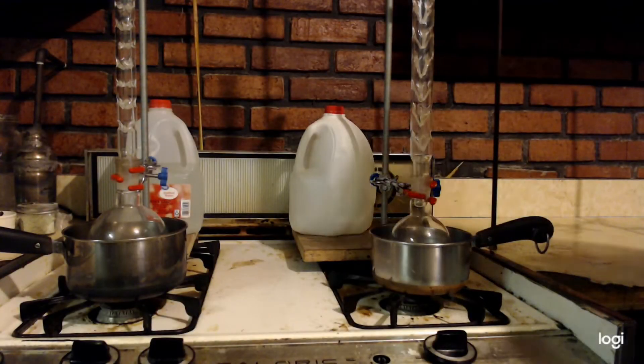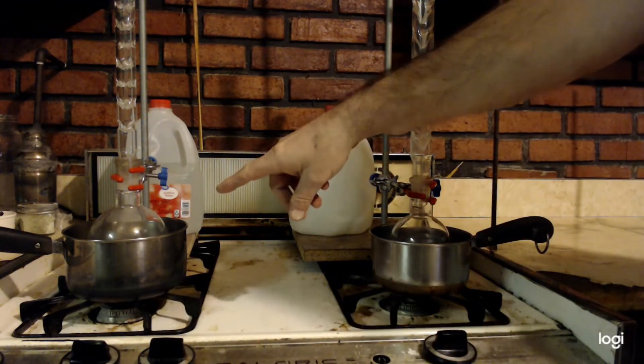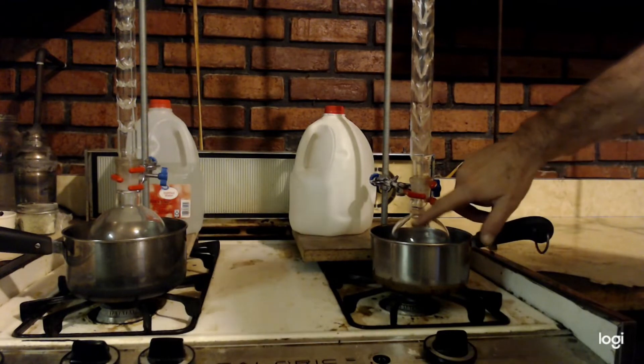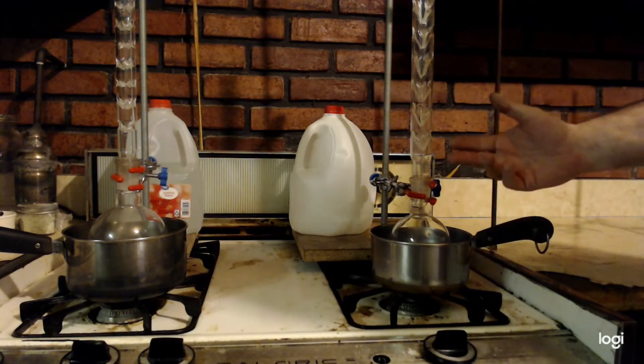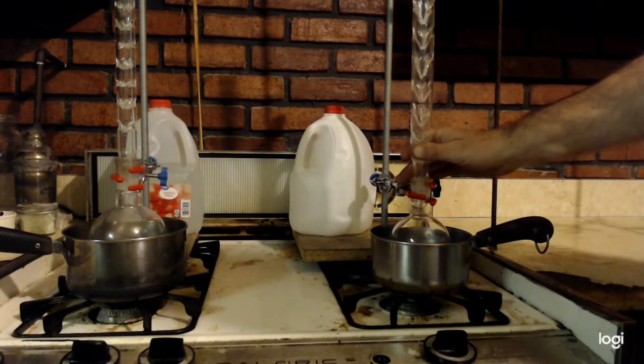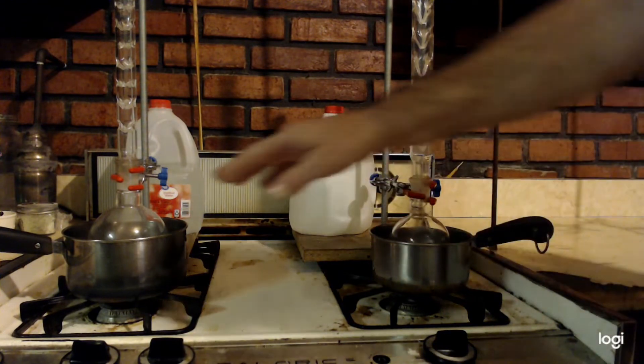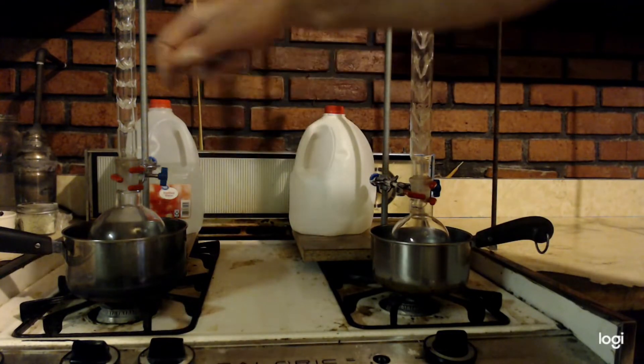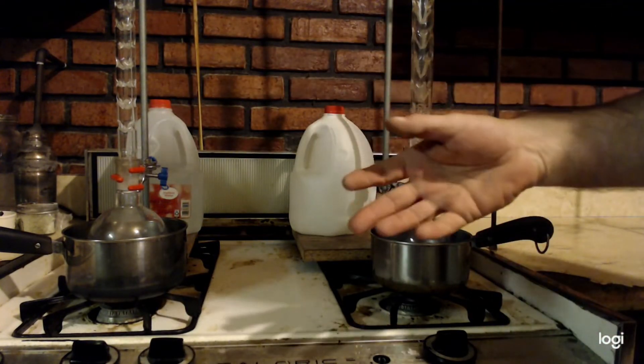Okay, so I'm not going to show this on camera because the camera's just going to be in my way. I'm going to tell you what I'm going to do. I got my product in there with my ethanol. I got a hot water bath here. I got just regular anhydrous ethanol in here and hot water here. I'm going to heat this up just between 60 and 80. I got the Vigreux column on here so it won't reflux away. I just wanted it hot so I don't want it cold putting it on hot glass. Because I'm going to boil the ethanol in there. And every once in a while I'm going to take this off with gloves and swirl it around so that it gets nice and dissolved. I want to dissolve my product.